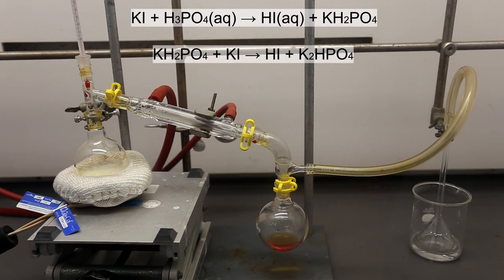The reactions that are likely happening are shown above. In the first reaction, less heat is required, and the potassium iodide reacts with the phosphoric acid to produce aqueous hydriodic acid and monopotassium phosphate.